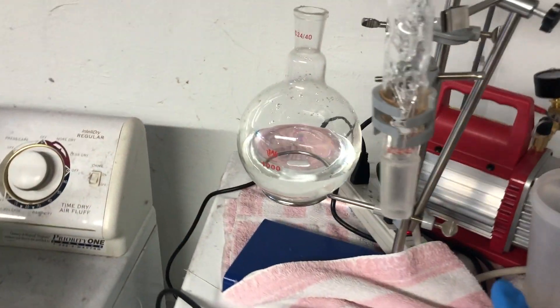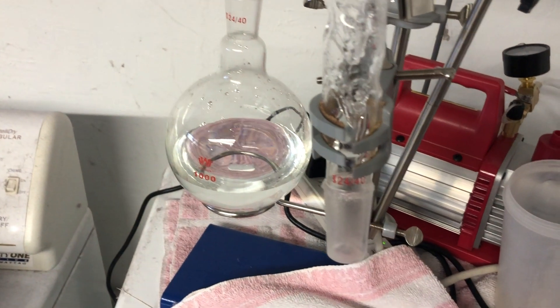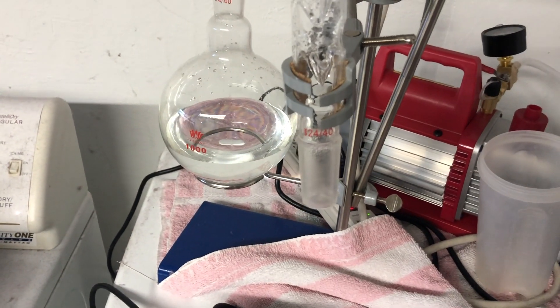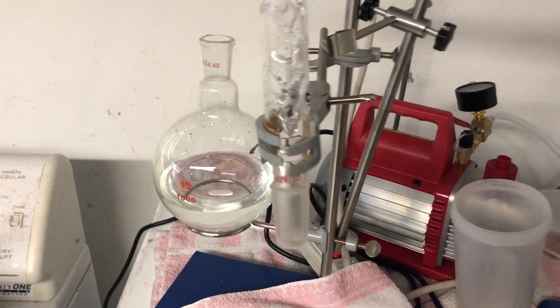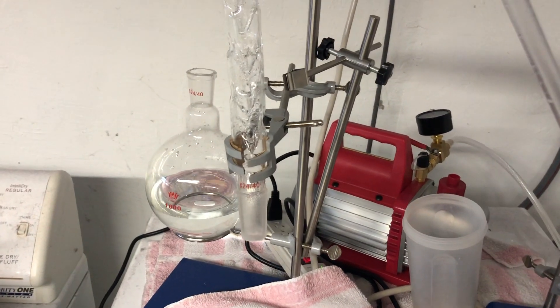I'm gonna set it all up. I put a little bit of vacuum grease on here. It helps maintain the vacuum and also so the components don't lock together which is bad. So I'll set it up.